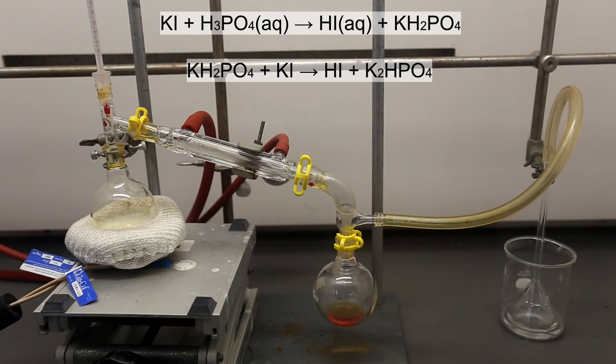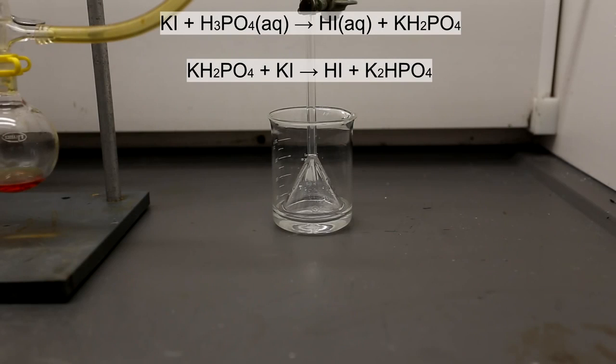At higher temperatures, when the water is being boiled off, the monopotassium phosphate can react with the potassium iodide to produce gaseous hydriodic acid and dipotassium phosphate. Be aware, however, that these reactions are only speculation.